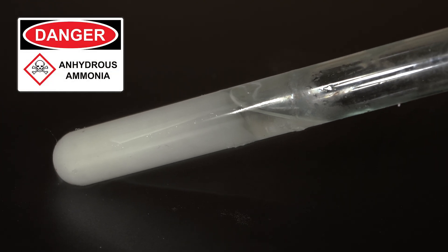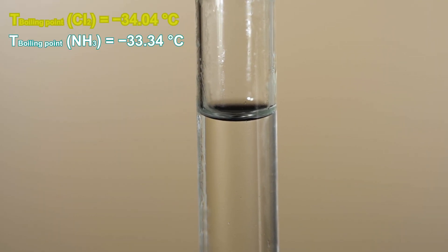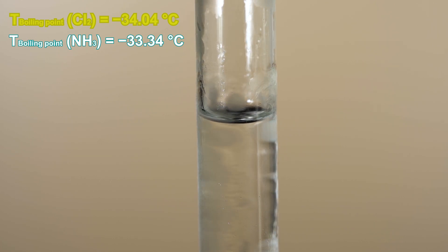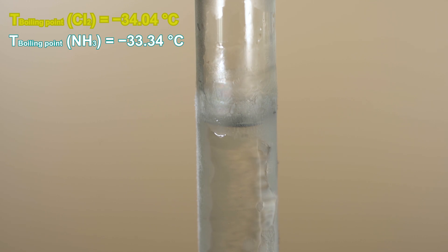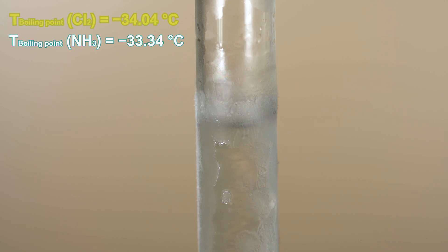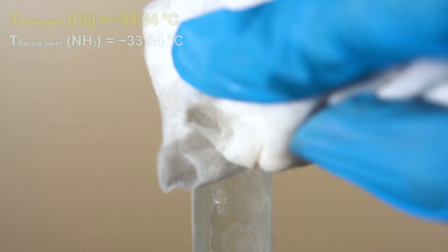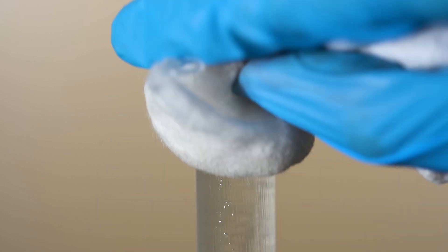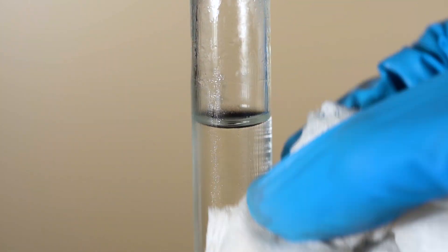Liquid chlorine and liquid ammonia have practically the same boiling temperature, which means that physically mixing them should not lead to any changes in the form of flash evaporation of the gas due to a sudden temperature increase of one of the substances. But what will happen from a chemical standpoint?